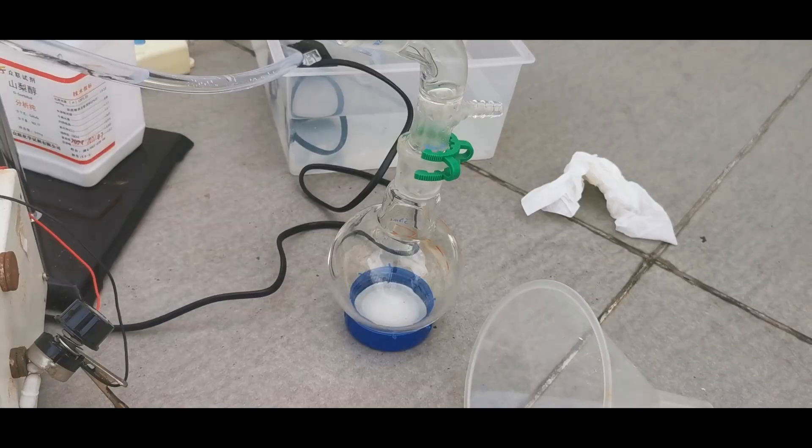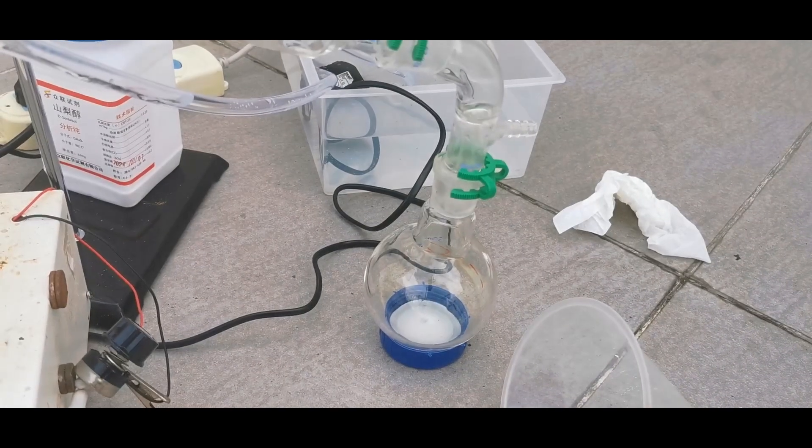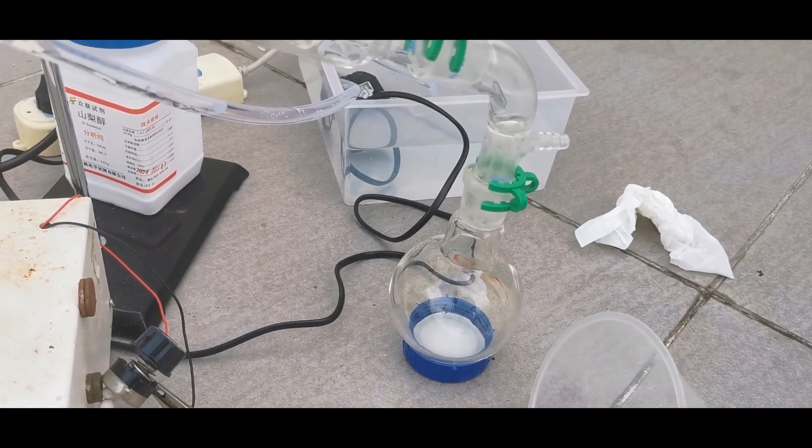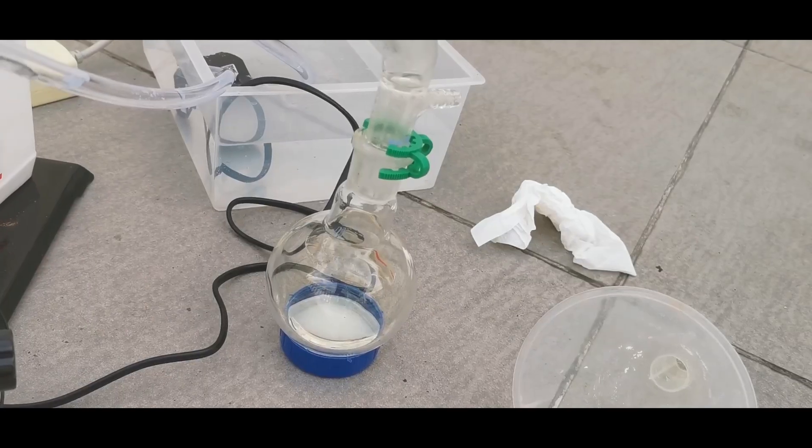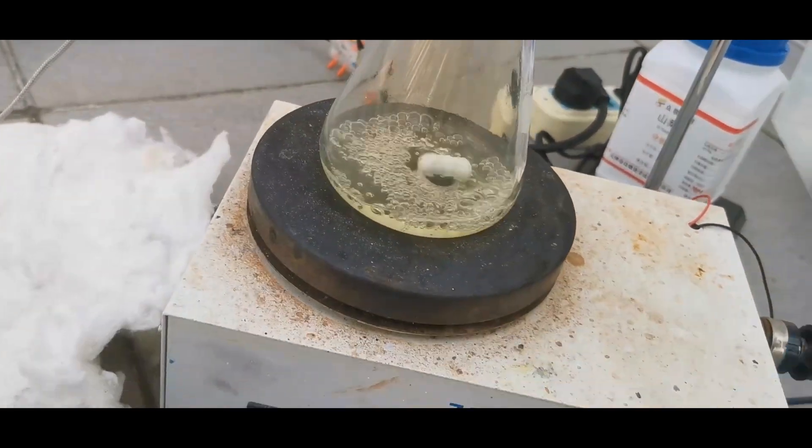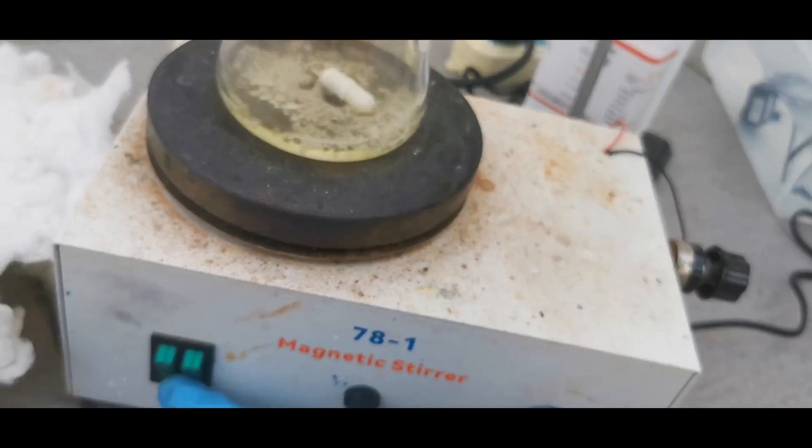The mixture boiled, and the vapor front slowly rises up in the adapter. A colorless liquid distilled over shortly after, which should be mostly water and hydrochloric acid. After around half an hour, the distillation slowed down to a crawl, indicating that low boiling components had been removed and we're left with perchloric acid.